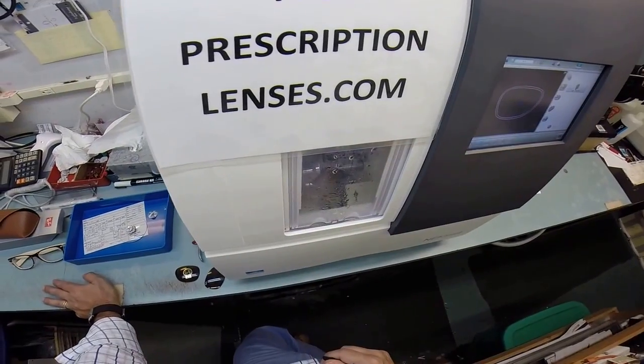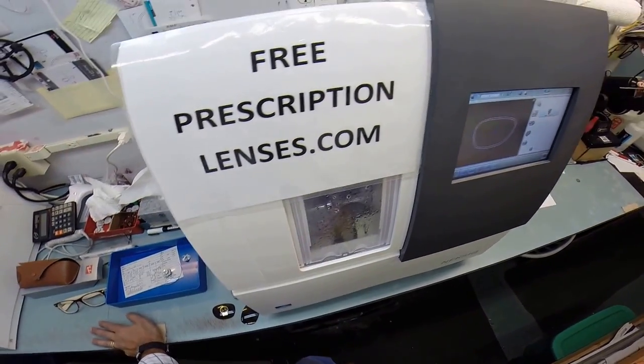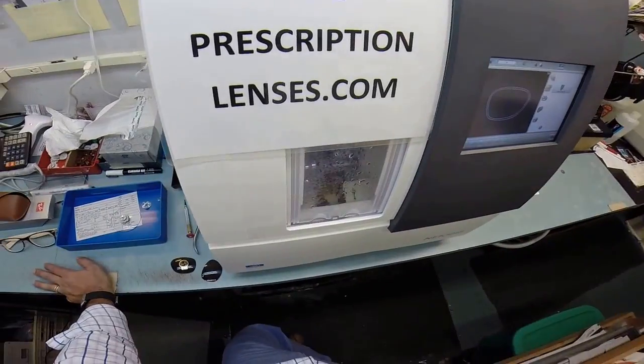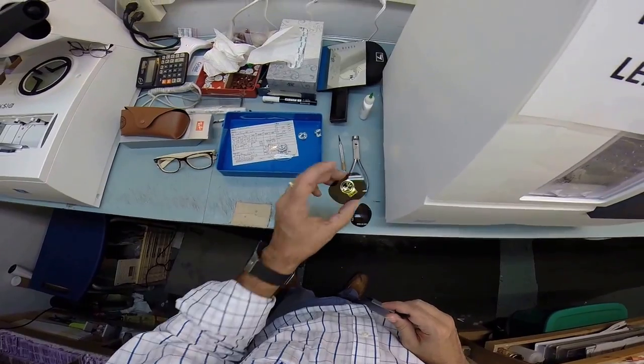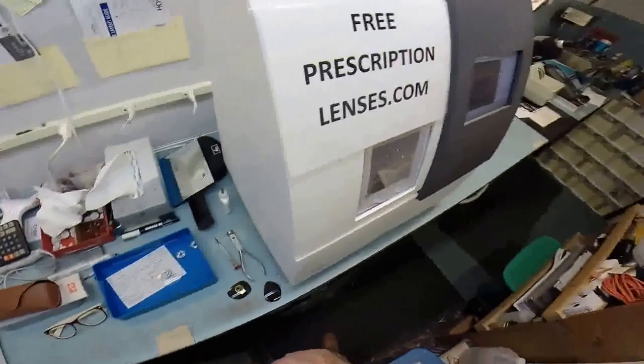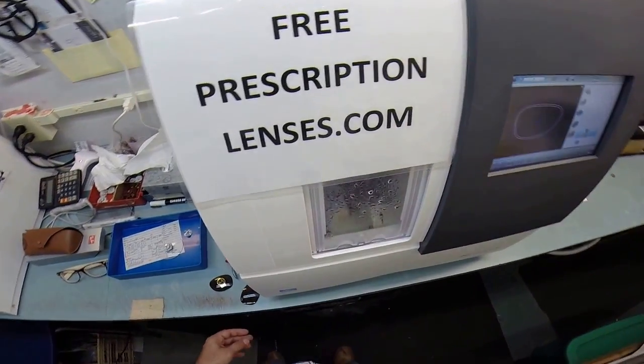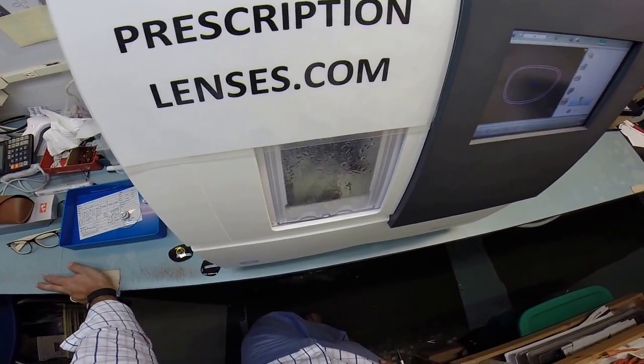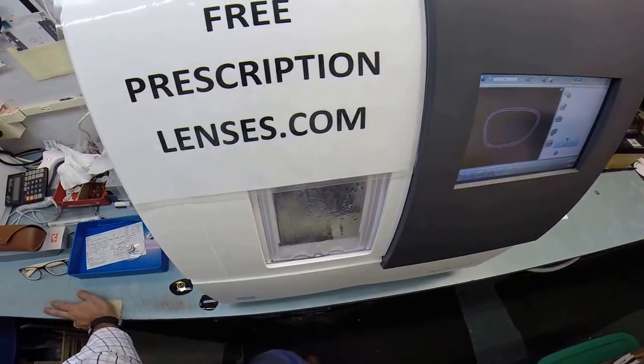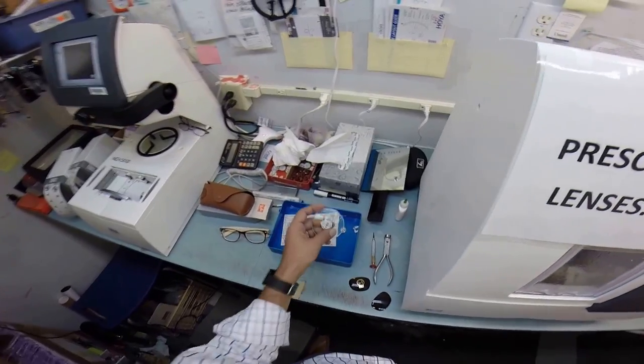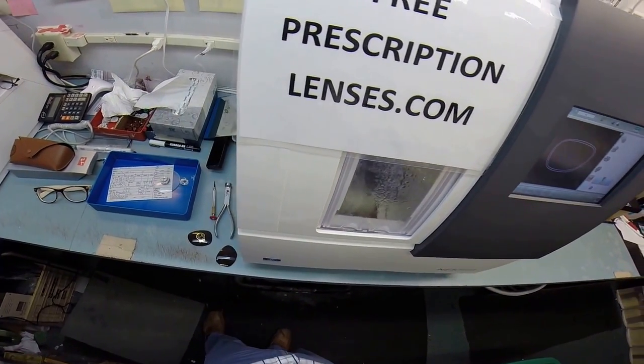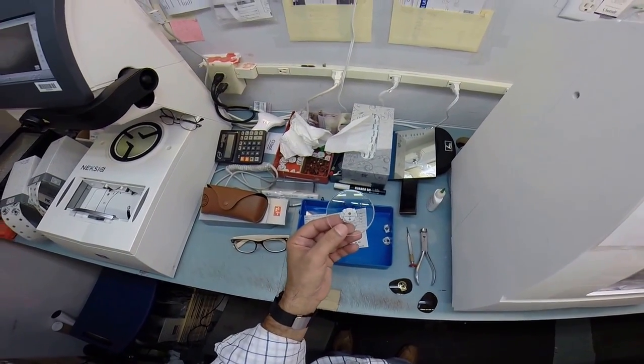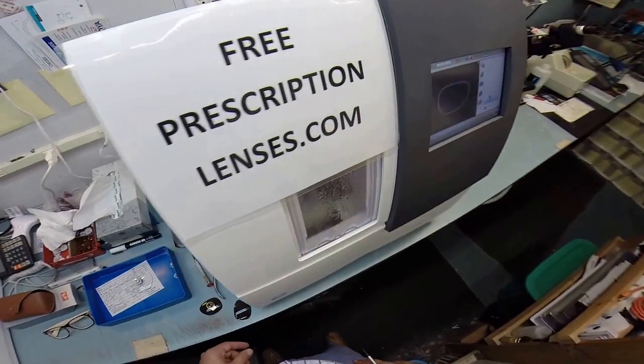And I'm sorry for repeating myself, but it is bulletproof up to 22 caliber. So if you're mowing, weed eating, walking in the woods, a branch hits you in the face, you don't have to worry. Now if something broke this lens and it sliced your eye wide open, game over. Your eye will never heal. It has seven layers. Only the outer layer, the cornea will heal. All the rest will be scarred for life. You don't have to worry about it with these lenses. Same material that people put into the safety glasses. Of course, Polycarb, when refined even more, becomes Kevlar. And that's what they put into the bulletproof jackets.